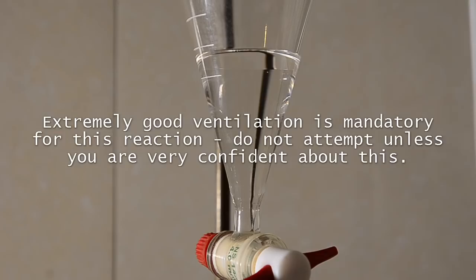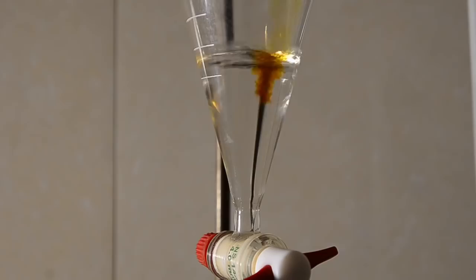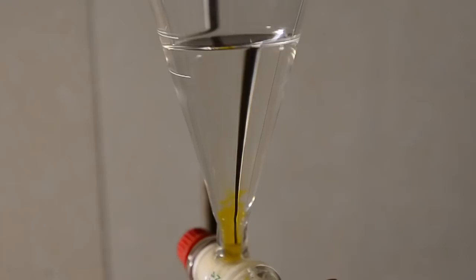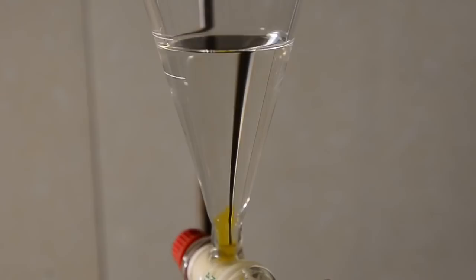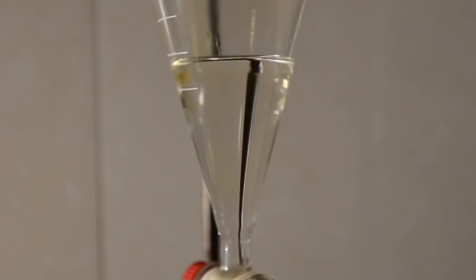Take one drop of the bromine in dichloromethane solution, and add it to the acetone in the separating funnel. You'll see the color go orange to begin with. The reaction is acid-catalyzed, and as the bromine reacts with the acetone it generates hydrogen bromide which is acidic. So the first drop takes the longest to react. Now that the solution is acidic, subsequent drops react much faster.